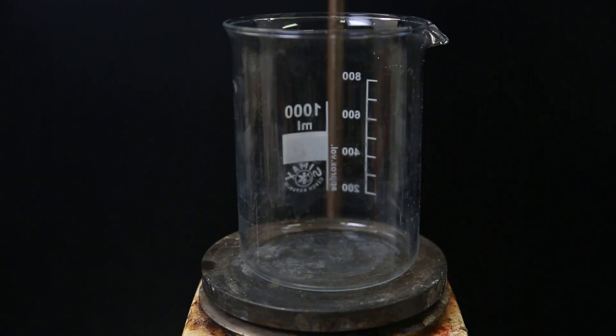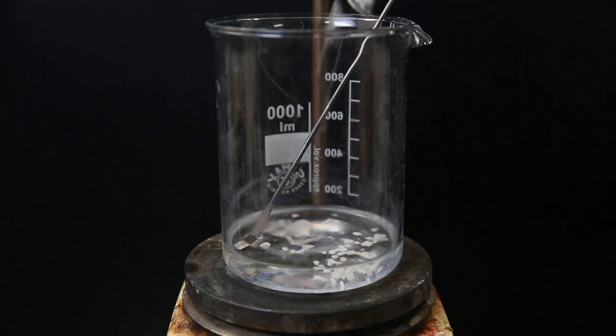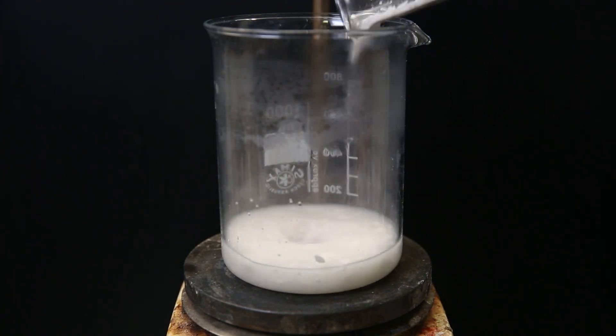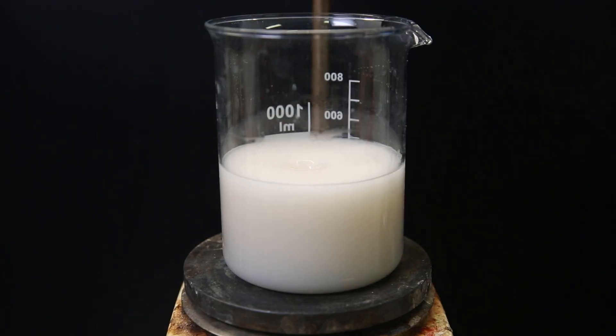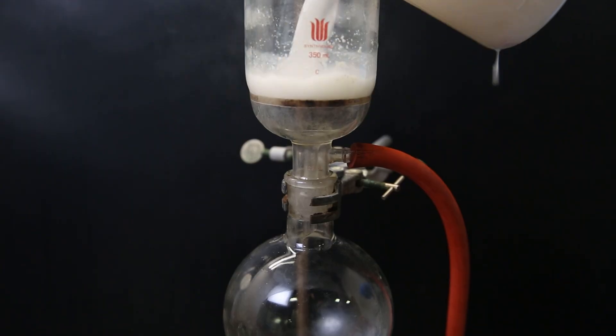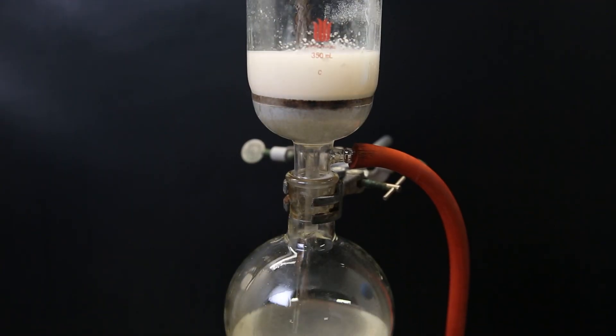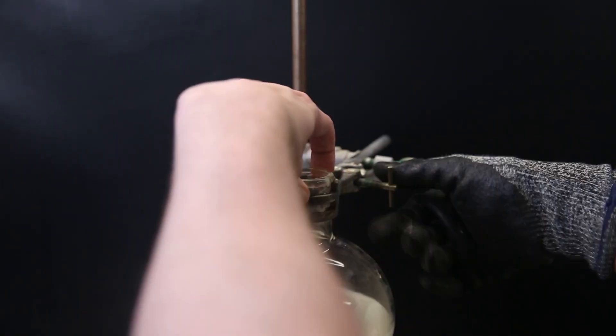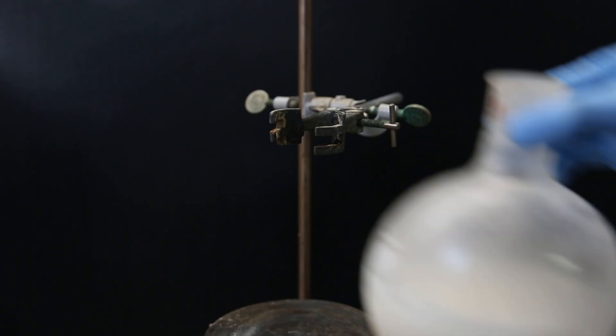I combine both the yields, but I want to make sure that it is really clean. So I will recrystallize it all from toluene. To do that, I saturate a boiling solution of toluene with the product. If not everything has dissolved, I can be sure that it is saturated. So when only a little bit of solid remains suspended, I filter it to remove the solid and get a saturated solution of PPQ in hot toluene. What remains on the filter is just a tiny amount, and I will discard it. The liquid filtrate I put in the freezer at minus 30C to crystallize out the PPQ.